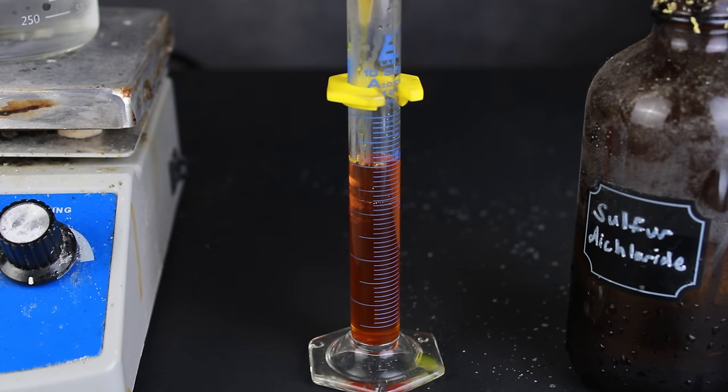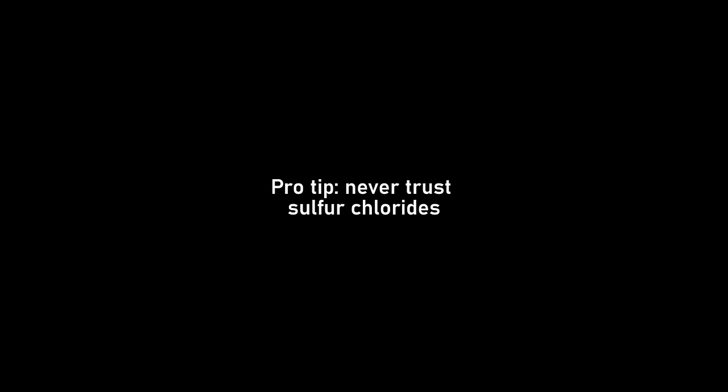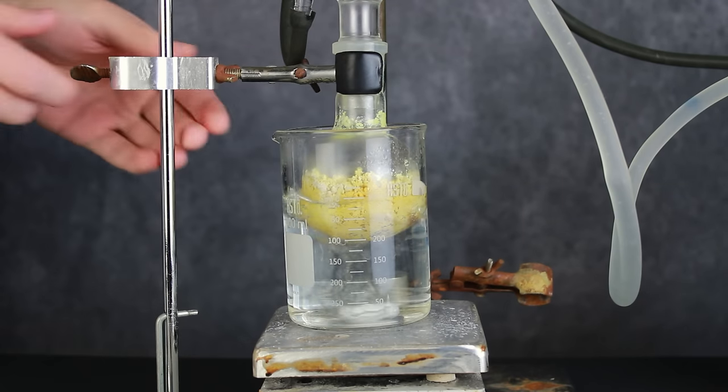Whatever this chemical was, we know the sulfur chlorides were entirely to blame for its existence, because sulfur chlorides are disgusting, evil, and most importantly, the only source of sulfur in this reaction. But I digress. Anyways, after refluxing for two hours, the condenser and hot water bath were removed, and a short path distillation was set up.